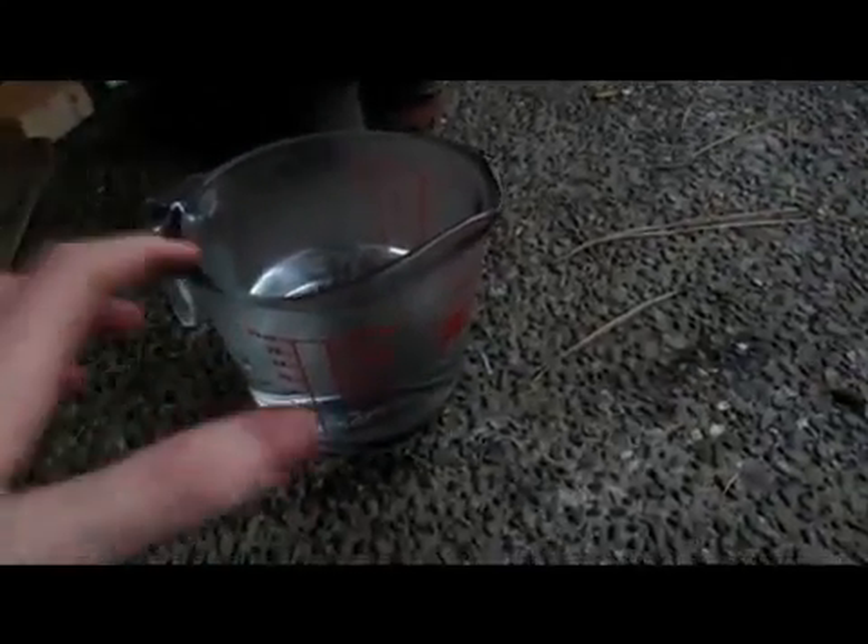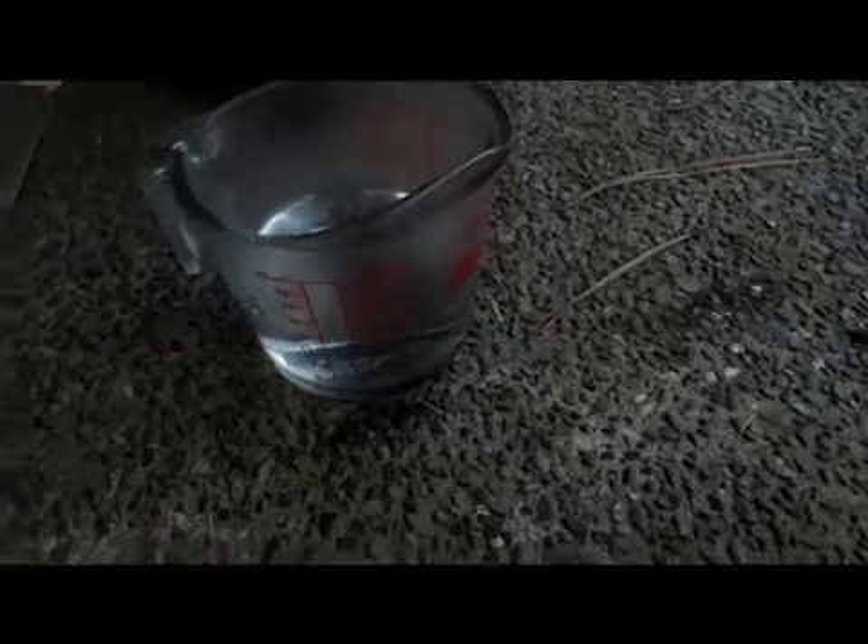For the next step, we're going to need some boiling water — nice and hot — and a pair of tweezers or something to pull out the cotton swab. We're going to pull it out under the water. Don't let it touch the air. We're going to do this all under the water and just let it sit so that hopefully the phosphorus will melt and we'll be able to collect it.